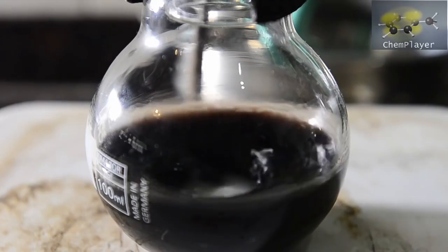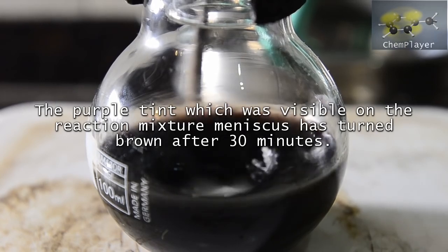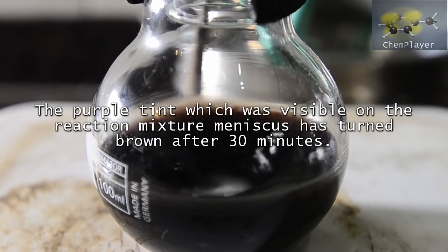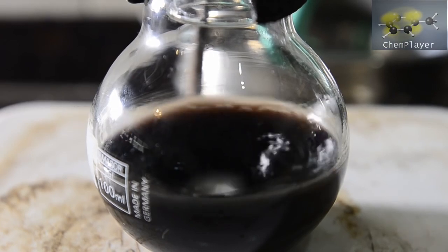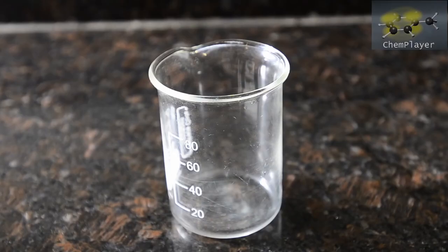Here we are on completion. You may not be able to see on the video, but the purple tint of the mixture is gone and the meniscus of the reaction mixture appears brown. So we remove the heat and allow to cool for a few minutes. And now we pour the reaction mixture whilst still warm into a beaker.